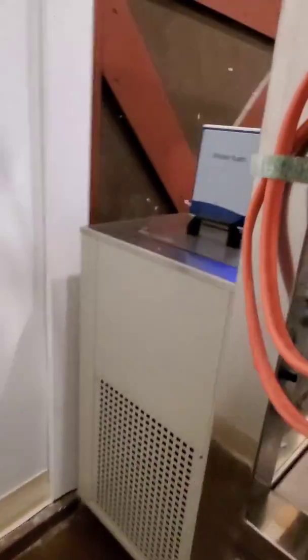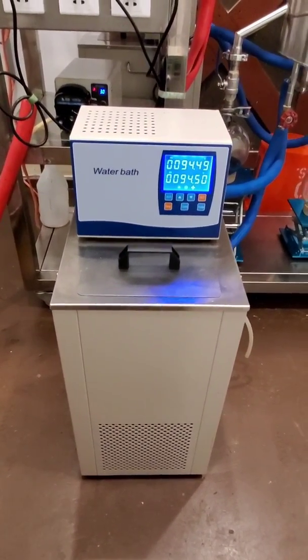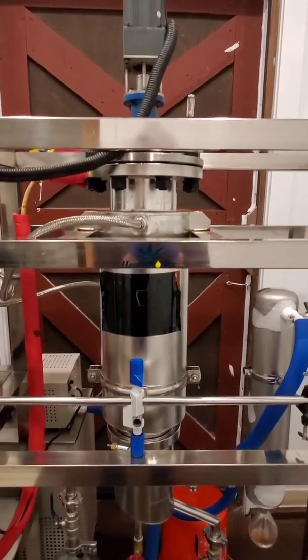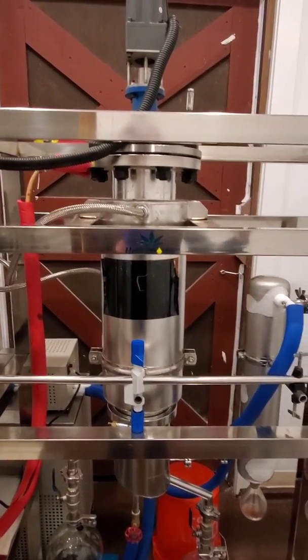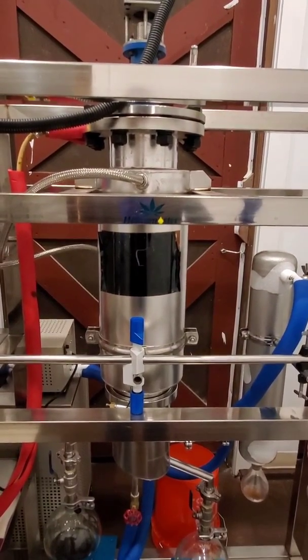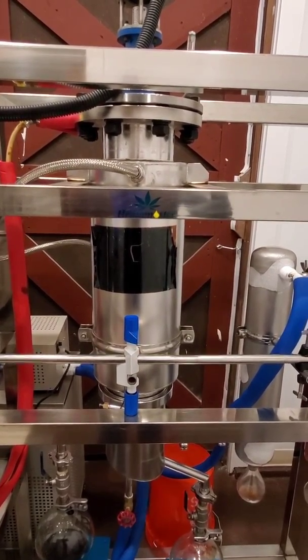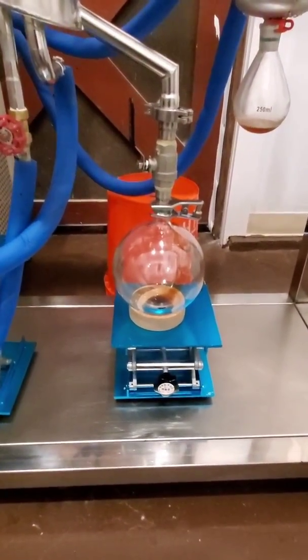Right behind here we have another machine — a chiller for your cold trap. Here we have another heater, and this is for a condensing coil. That condensing coil is inside of your evaporator — the moneymaker here. What we have going on in the evaporator is a bunch of rollers that take the oil being fed in and spread it onto the wall so that the oil heats up, which allows the CBD vapors to separate and get collected into a distillate collection flask. After the vapors cool down, they turn back into an oil.